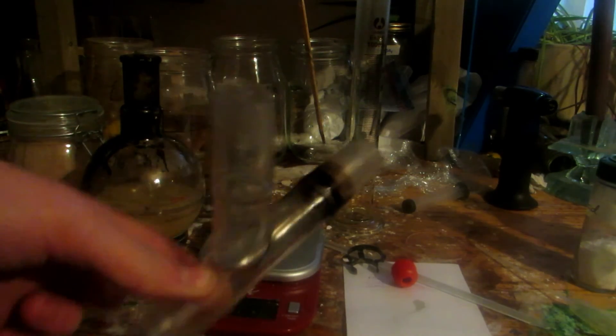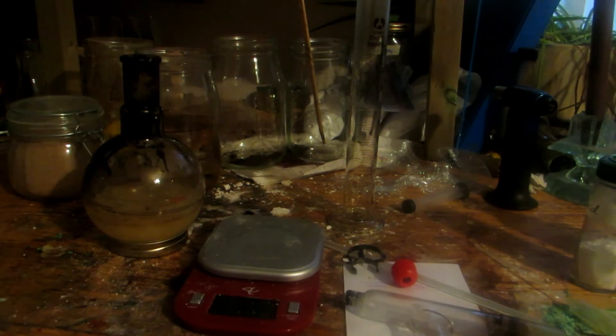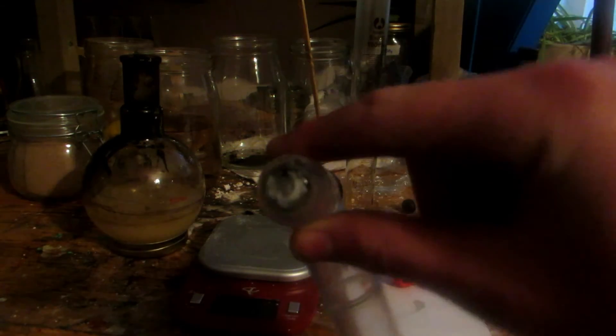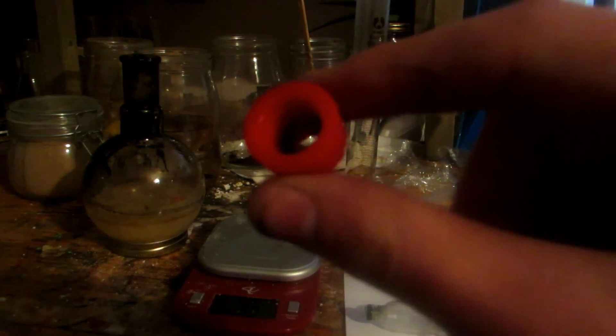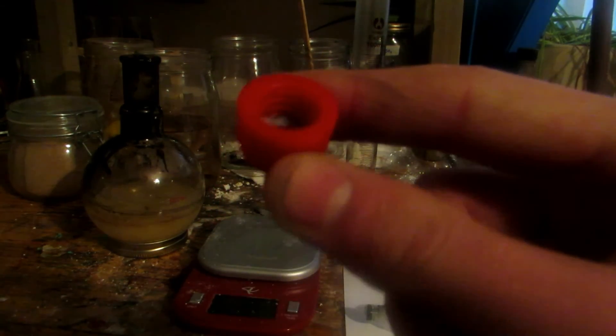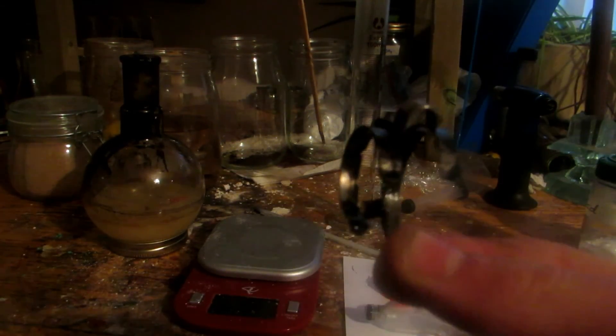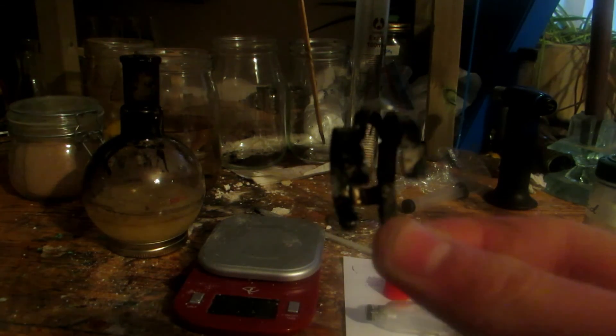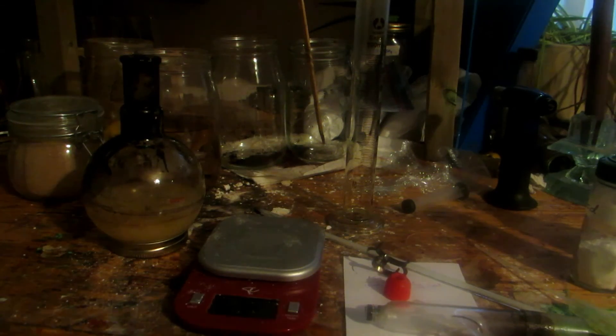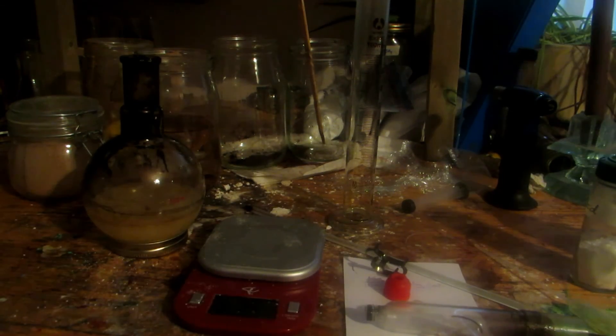Now the next part of the apparatus over here, which is where it was coming out, you can see where it was leaking the black gunk or whatever. I believe this was the reaction of the nitric acid possibly with the oil that I used to grease this. Definitely grease it with something else other than oil. And then the top part of it looks pretty bad. It got some sort of white crusty stuff and started to dissolve the rubber. And now that little rubber piece that was holding the thermometer actually didn't do too, too bad, but it will have to get a new one. It's looking pretty bad in there. The one keck clamp that was closest to the distilling flask, you can see it took some brutal punishment from the nitric acid fumes. If you used a plastic keck clamp, it would not survive. Believe me, you really do need to use a metal one. And I haven't washed any of these things yet. They're just totally fresh right out. And then there's a thermometer with black gunk on that too. Thankfully with a bit of scrubbing with steel wool, most of that should come out, hopefully.